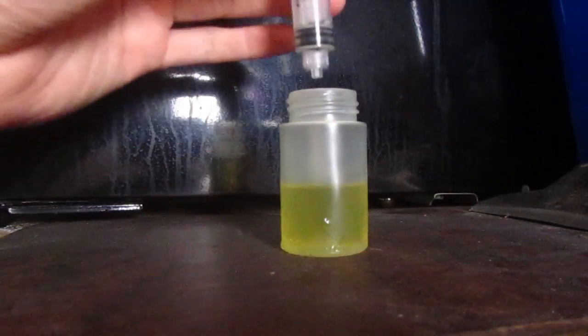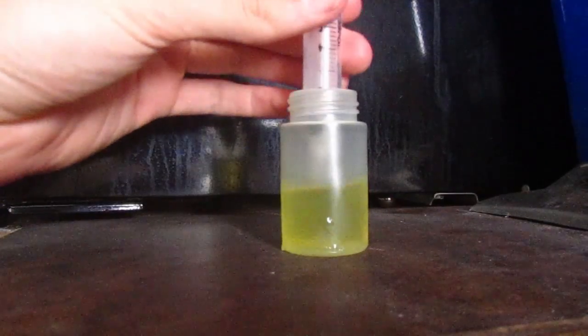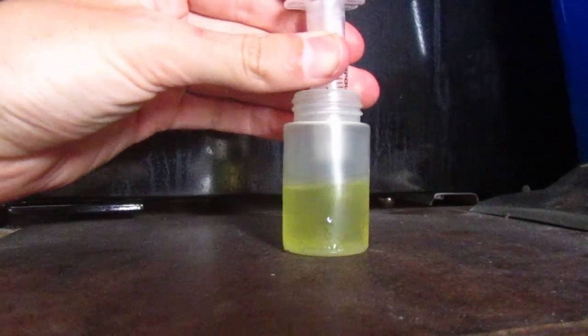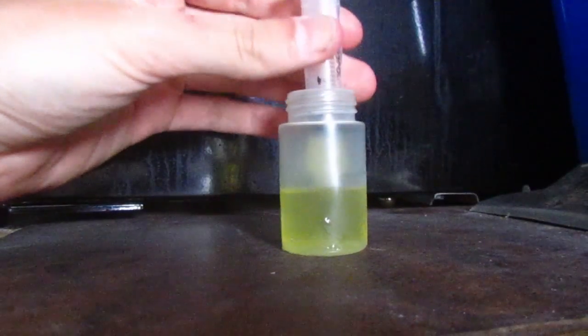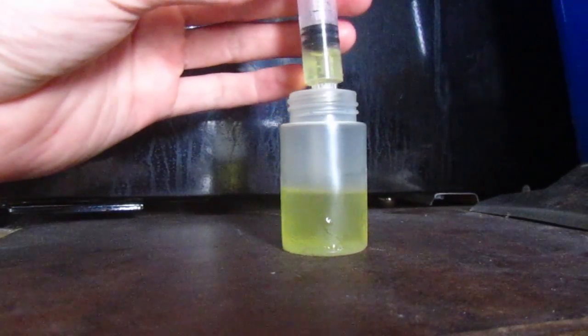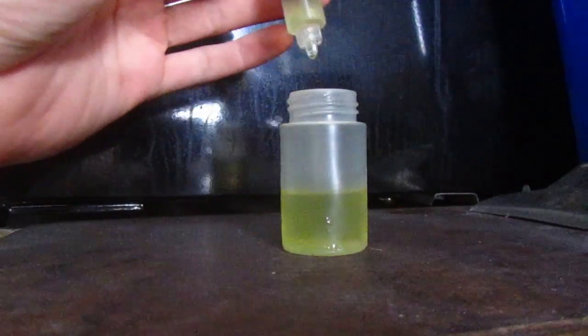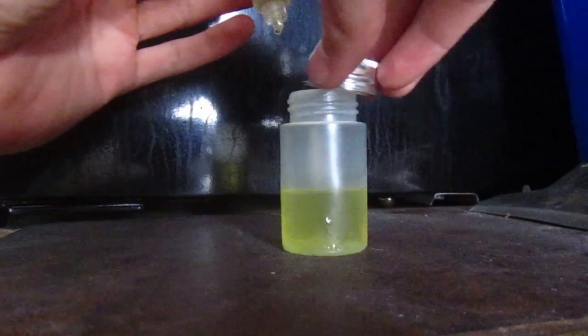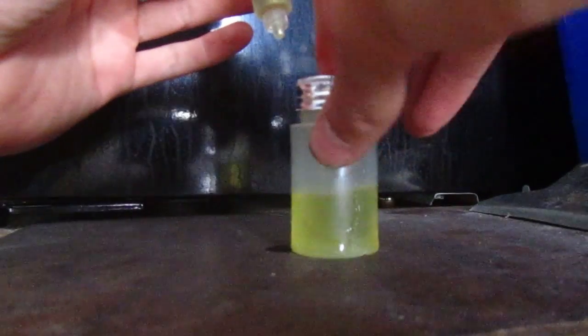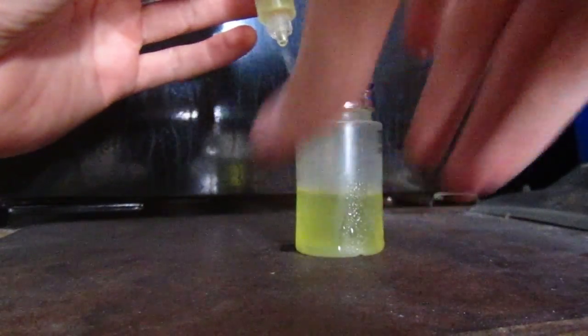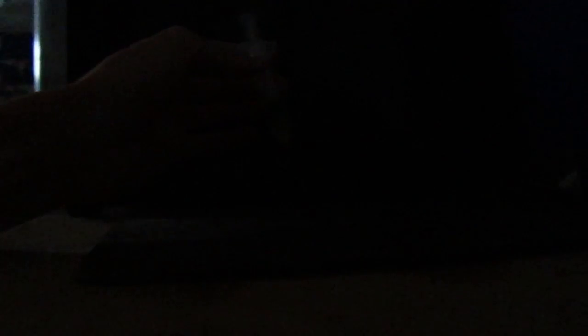Let's see, I'll draw up about one cc worth of the liquid. And now I'll show you the cool color that this looks like when it burns. It's really interesting.